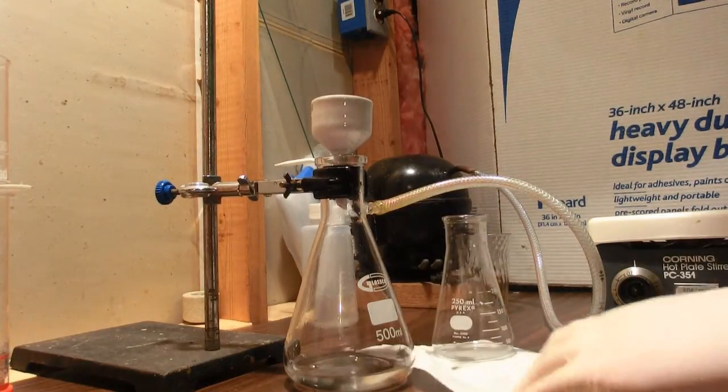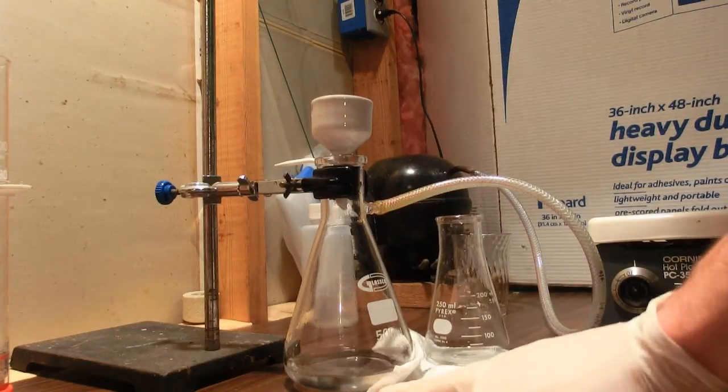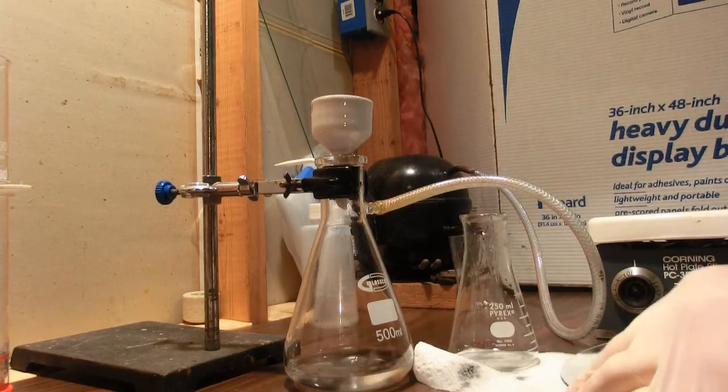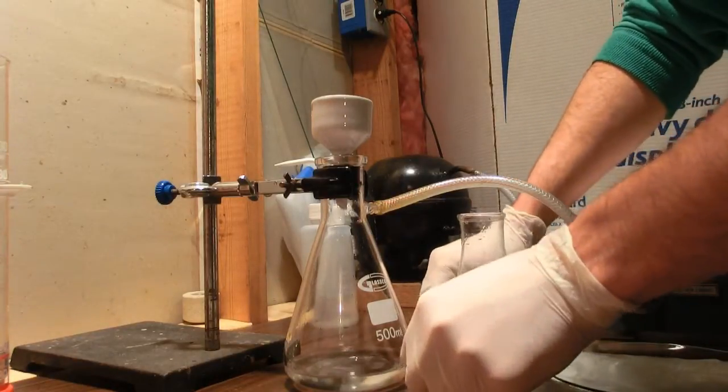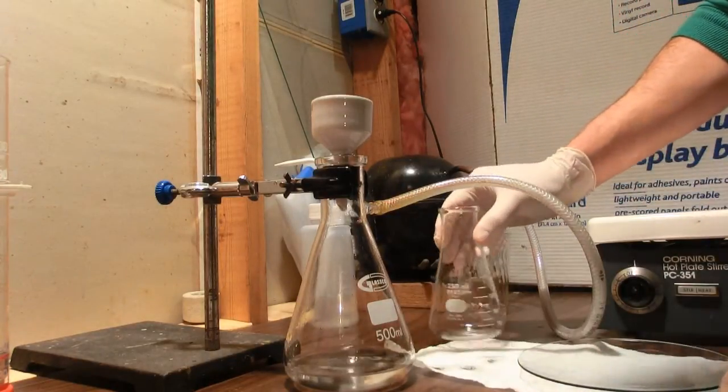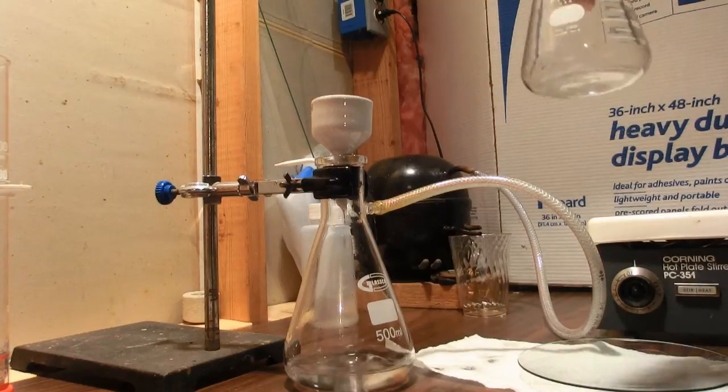Alright, we'll pull air through the funnel to dry out the gunk so that we can weigh it and see how much lead or unreacted stuff we had.